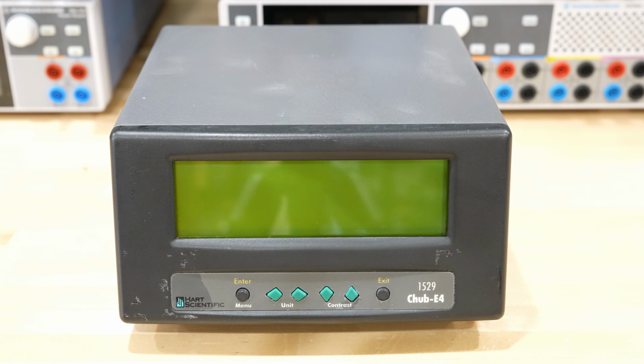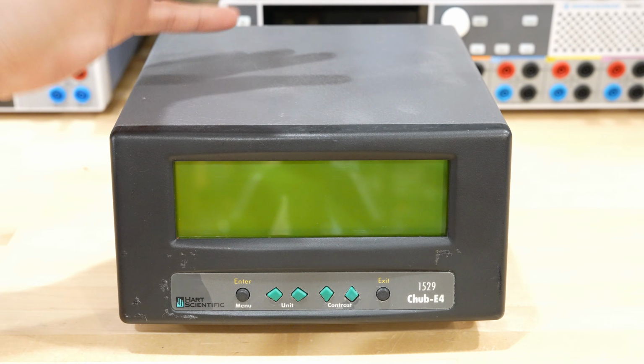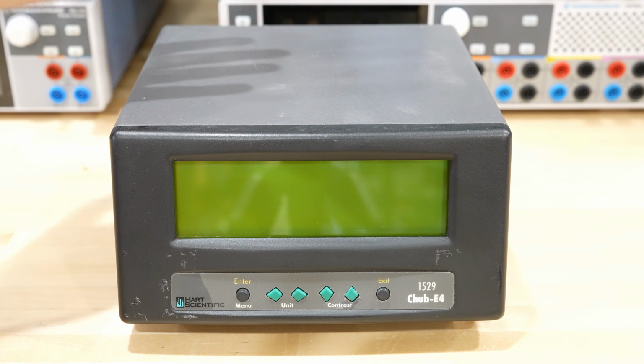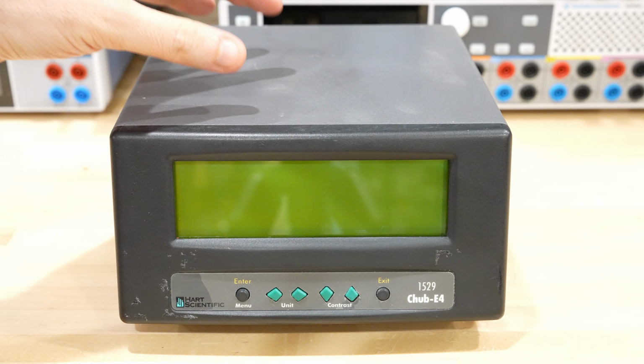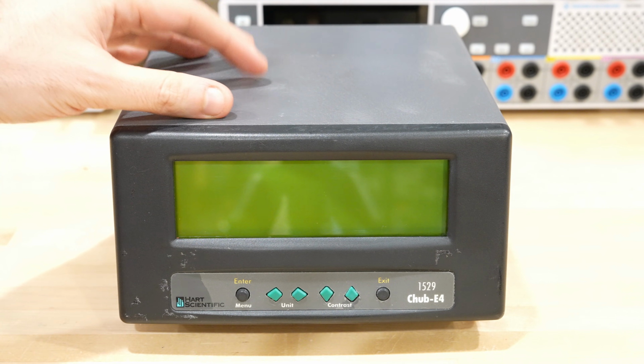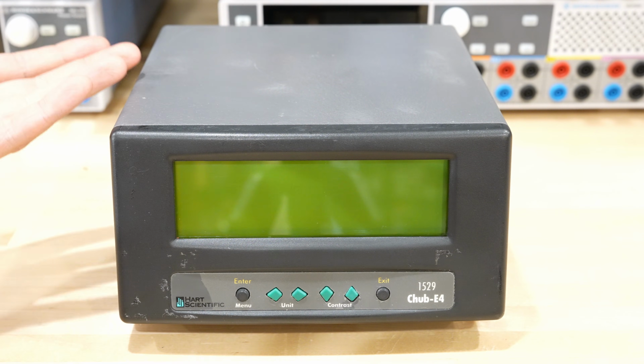In this episode, I'm going to try another repair. This is a Chub. Now, what is a Chub? It is a multi-channel temperature sensor. This is actually from Hart Scientific, which was later acquired by Fluke. And this particular model is intended for resistive-based temperature sensors, which we will take a look at in the back. Unfortunately, this one doesn't work. It does have a big LCD screen and a couple of buttons with menus built into it.